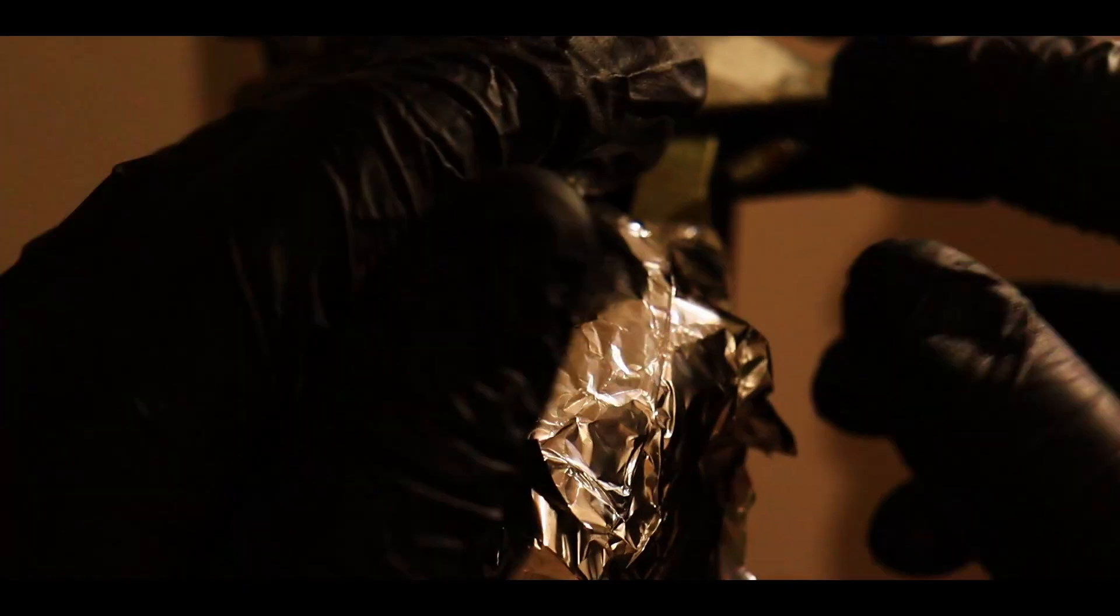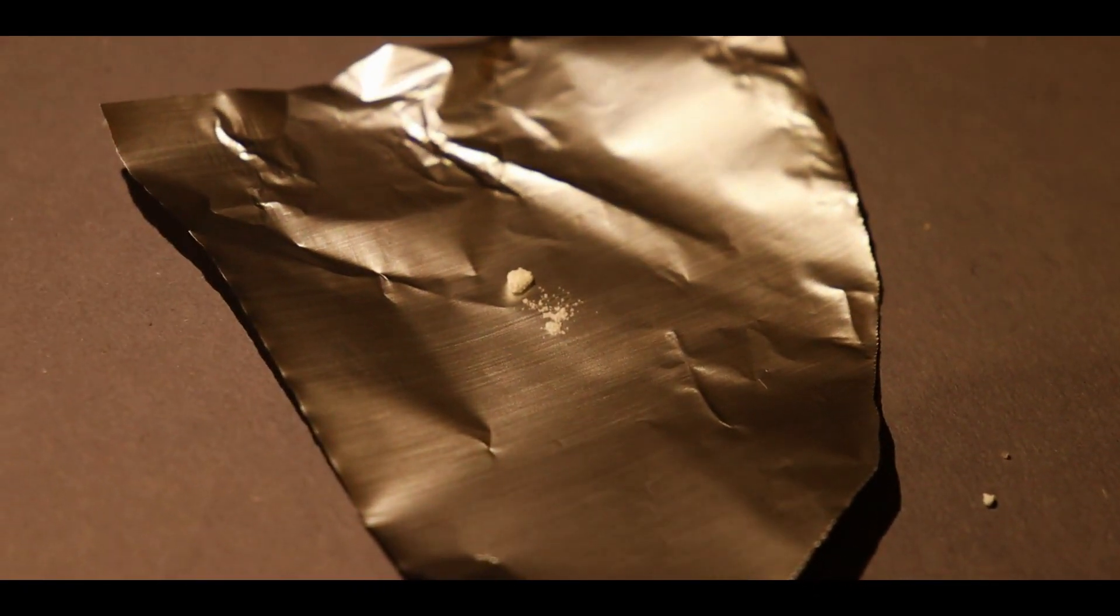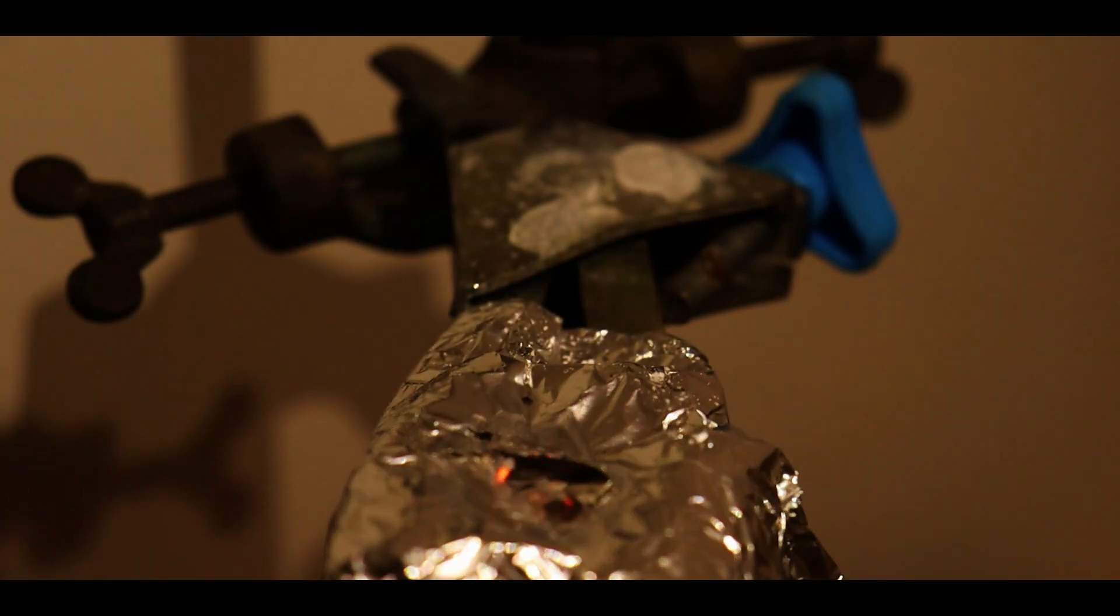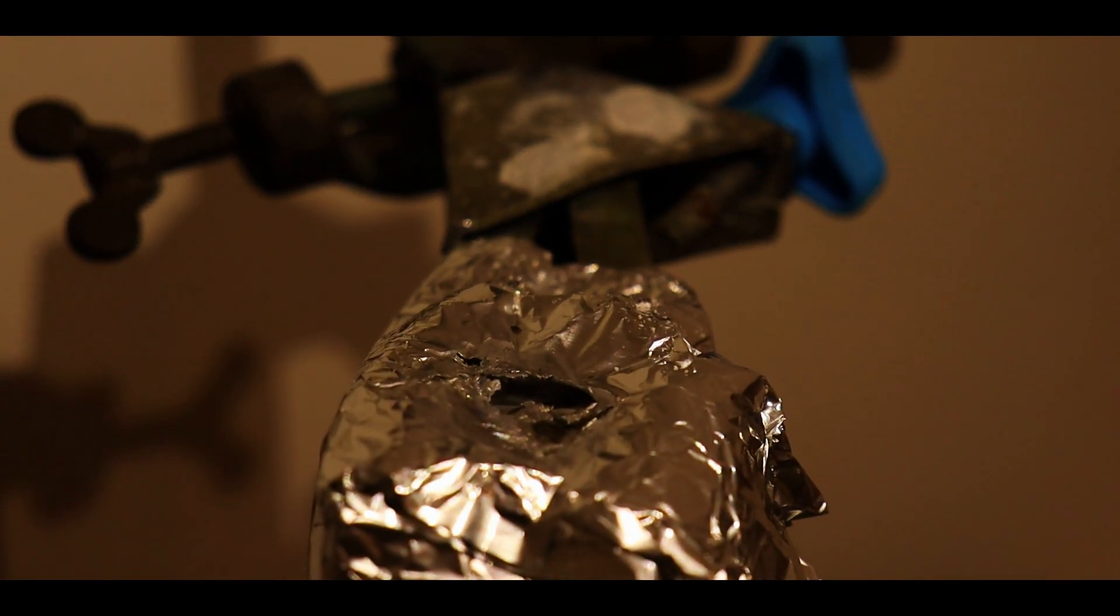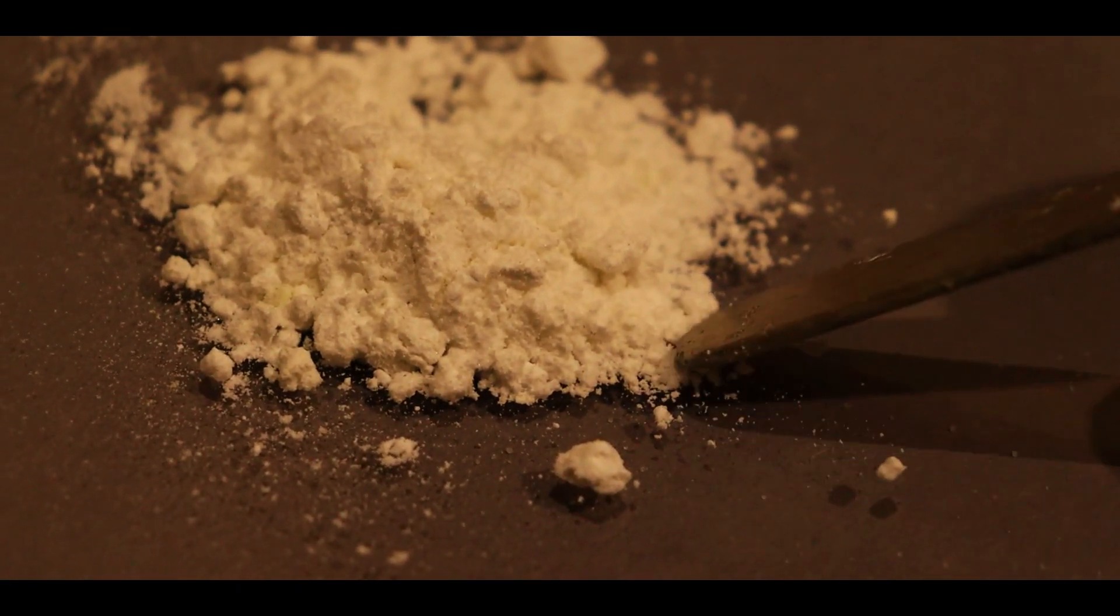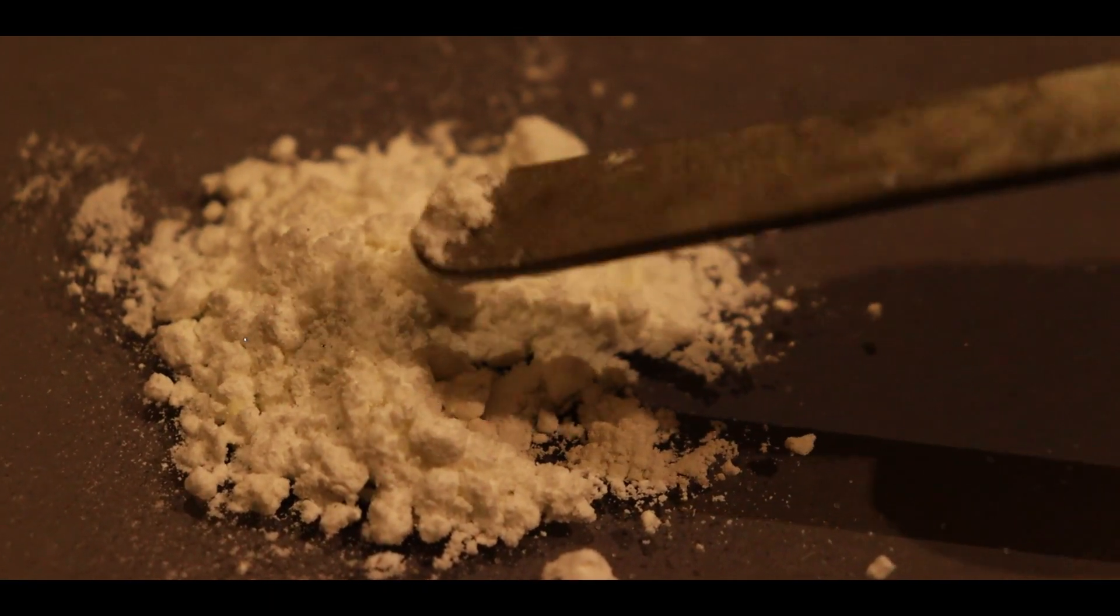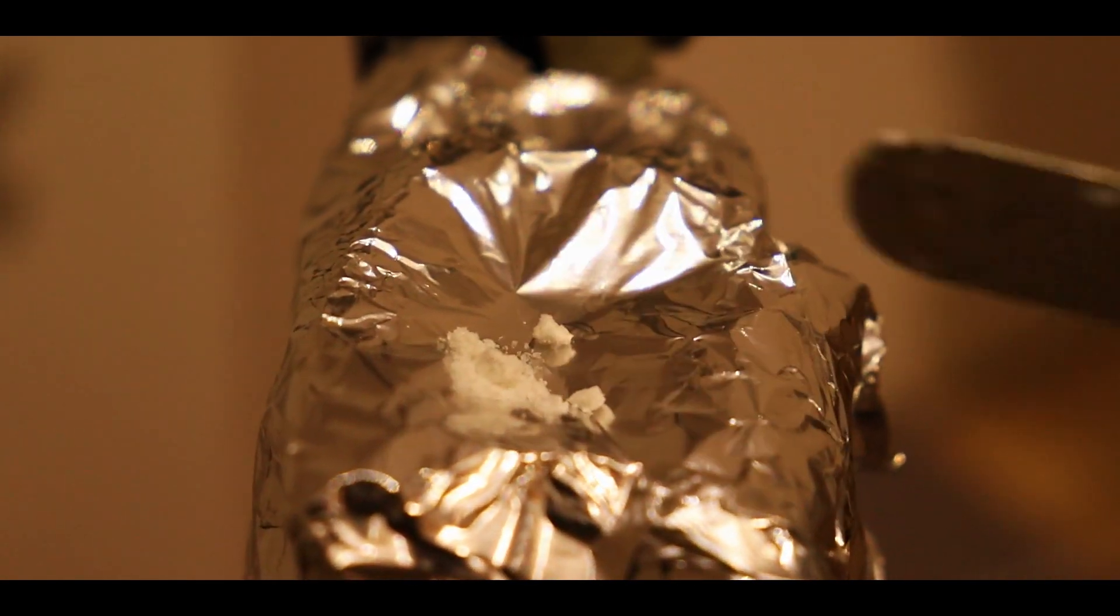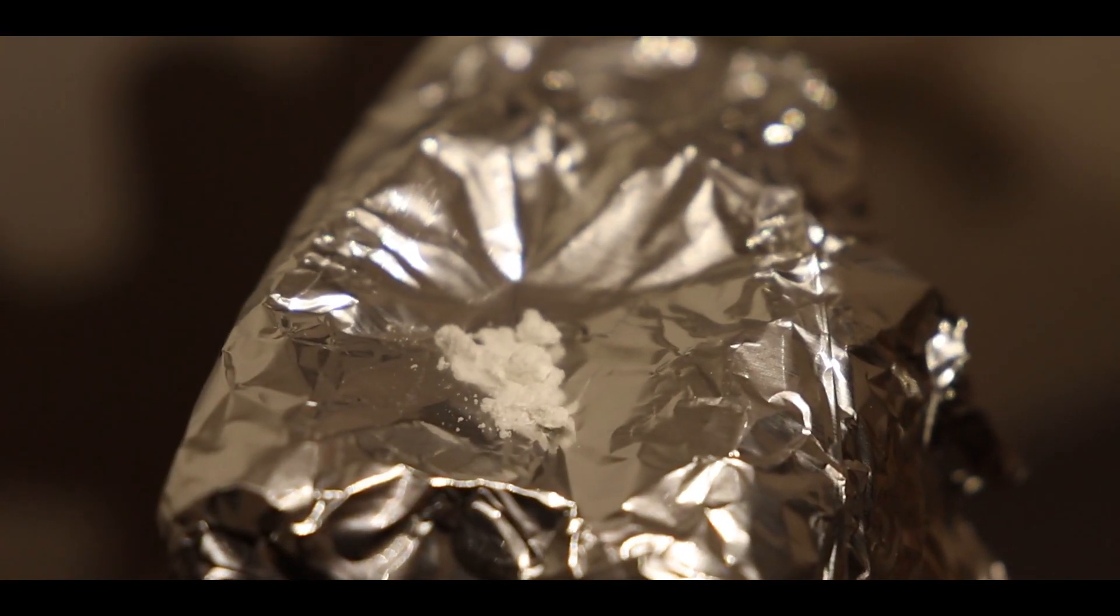Okay, so let's firstly try burning it unconfined on some aluminum foil. It should burn very rapidly. Nice. It burns very fast and leaves behind practically no residue. What it leaves behind though is a very strange smell, which is very similar to that of chlorine. But it is better to not smell that, as nitramines are always decently toxic.